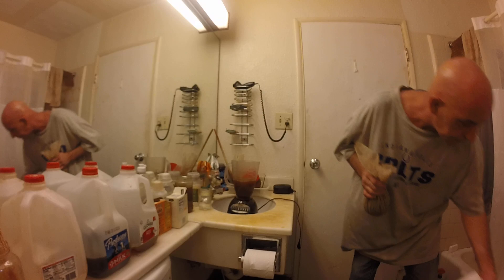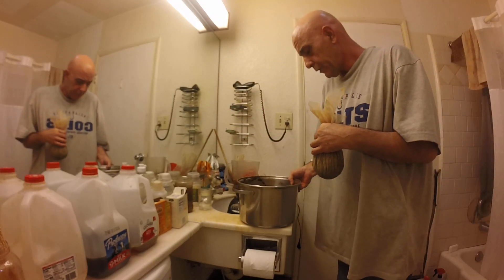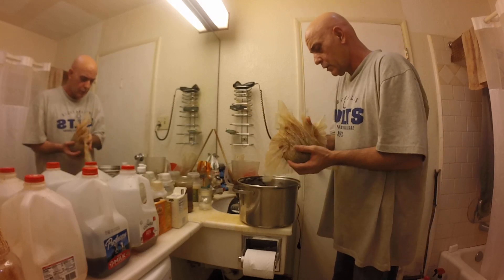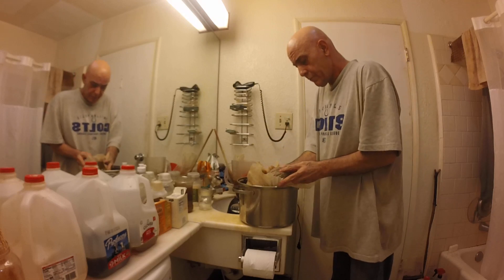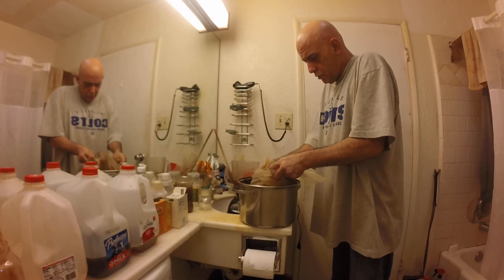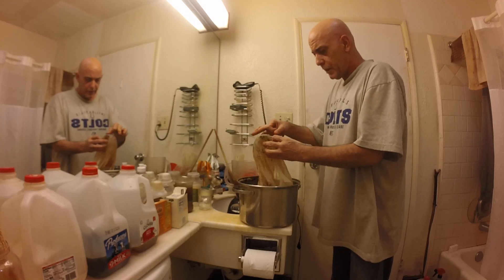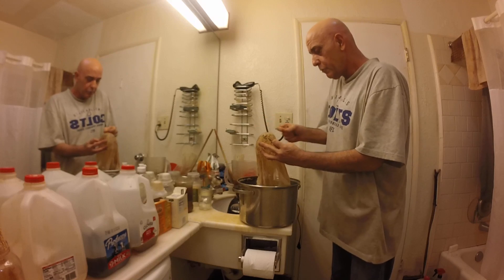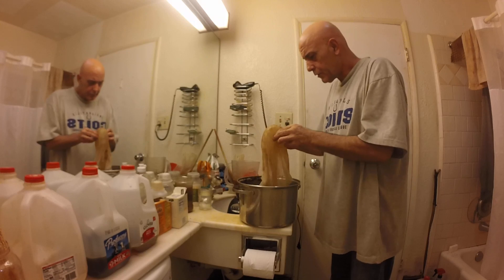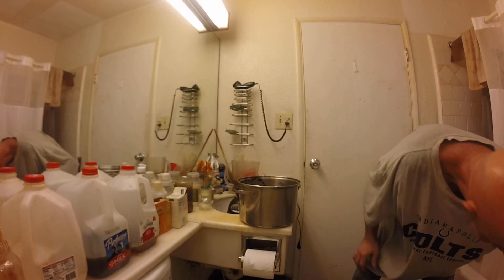My left hand is almost completely worthless. So now I can take this little bundle of seeds and just go right back in there with it. Get a little shaky-shaky. I won't make too much of a mess by just tapping this. Let me get this blender out of the way real quick.